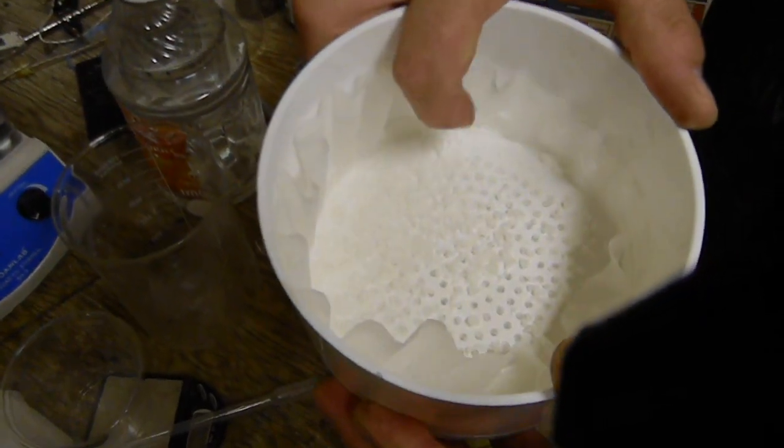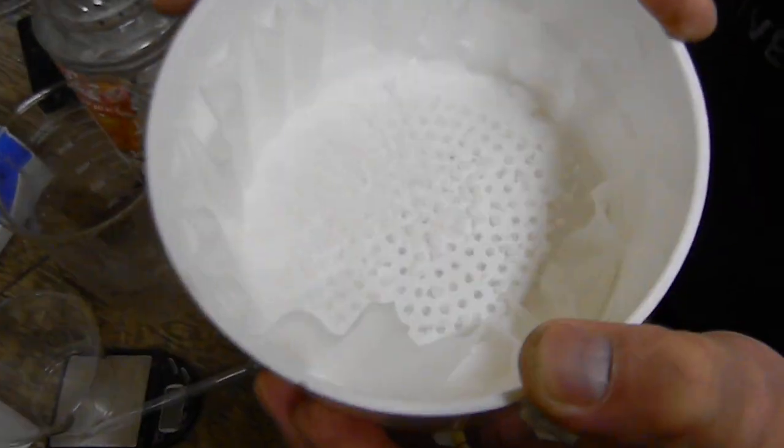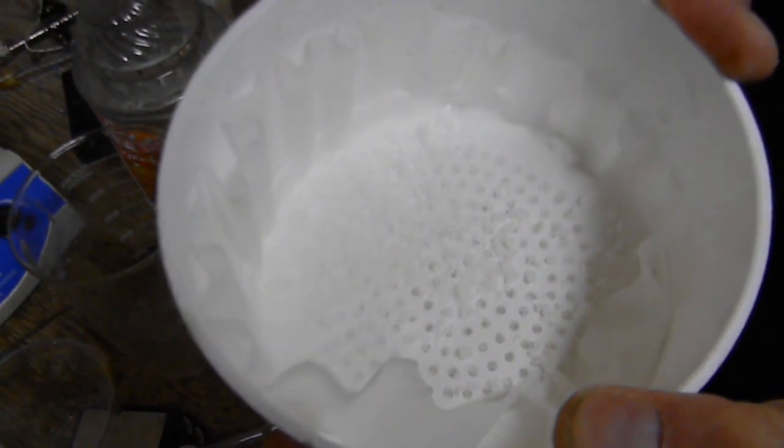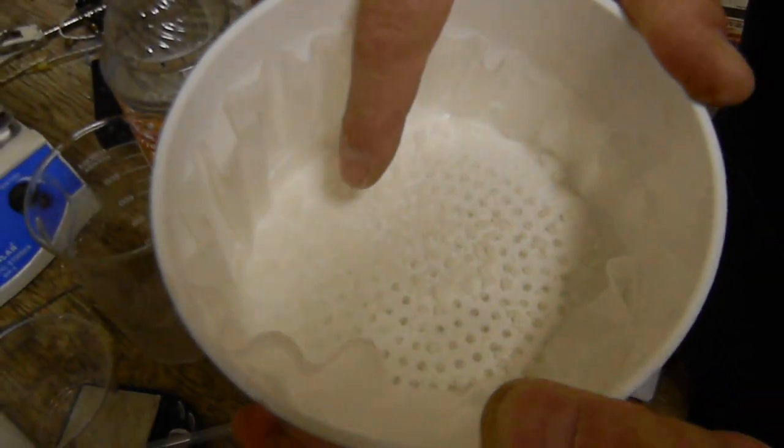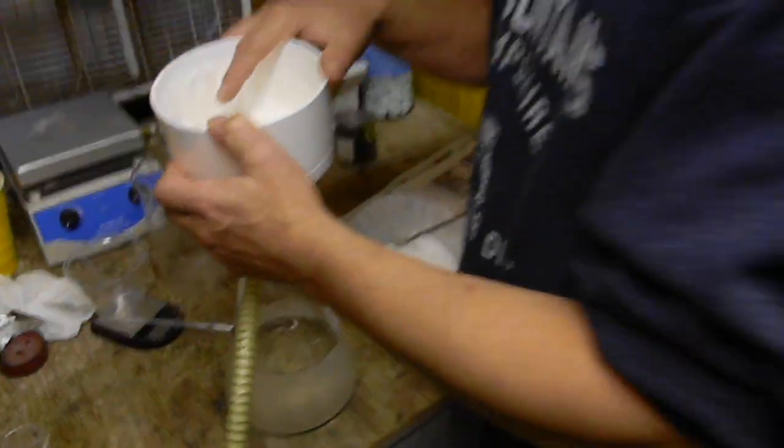See how much coarser, how much bigger the crystals are. I don't know if you can see that at all. But that's what it ends up like. That is recrystallized and if you wanted to, you could store that or do melt cast with it.